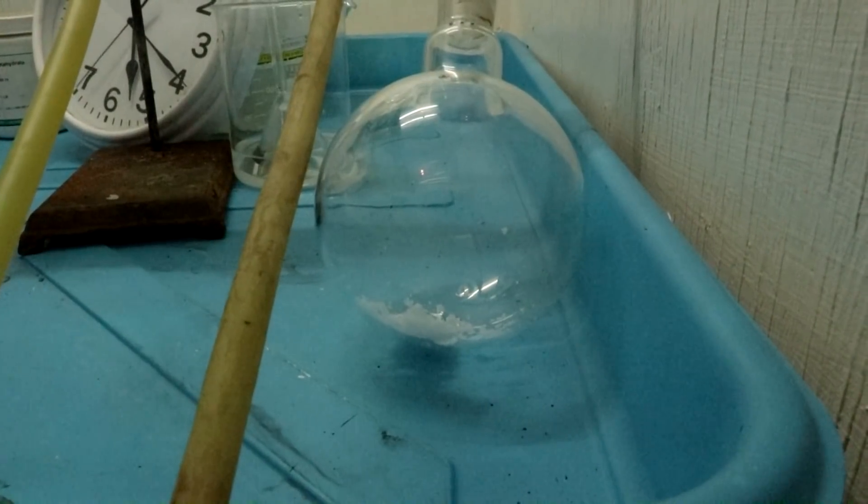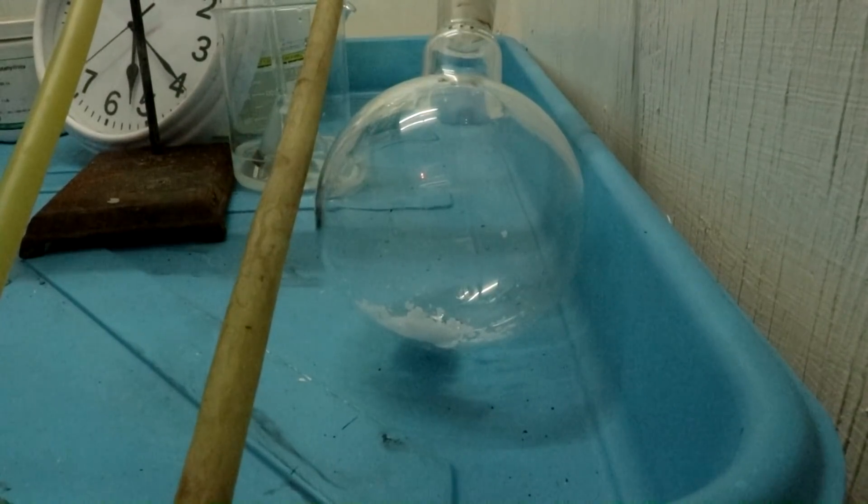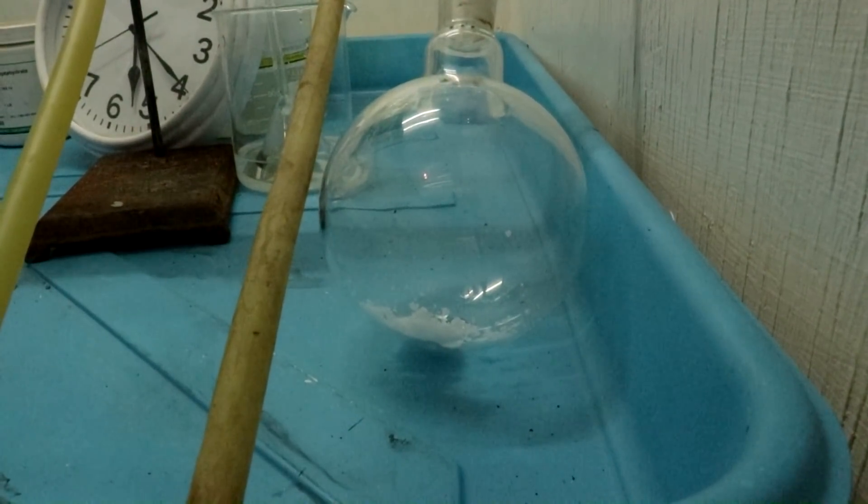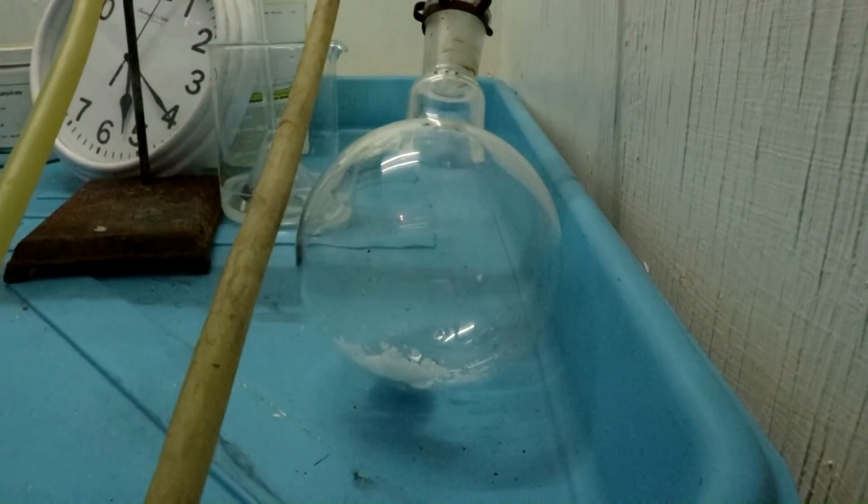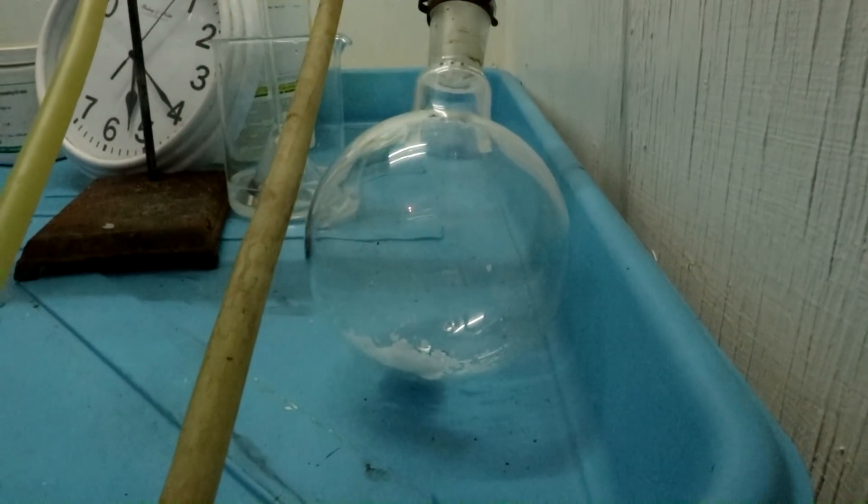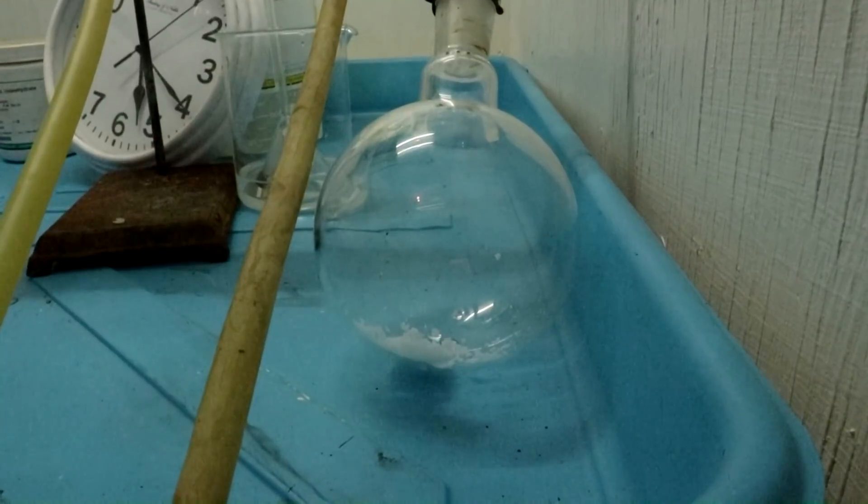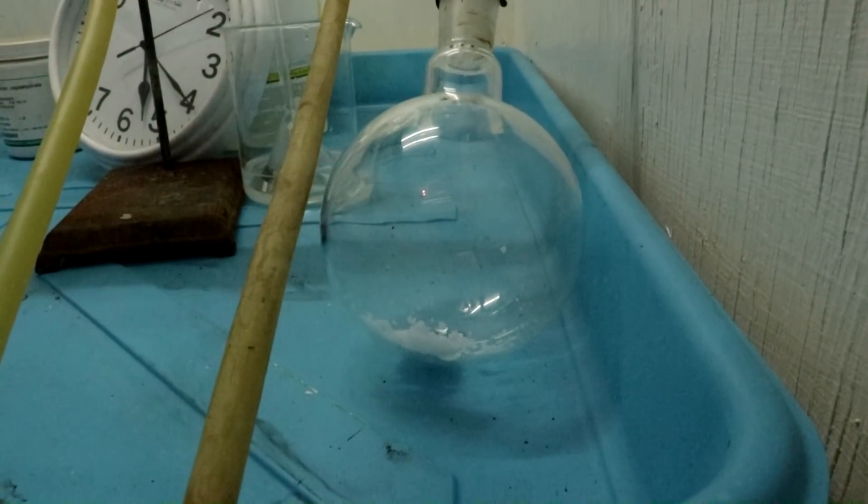What I'll form over here is the salt of prussic acid and sodium hydroxide, sodium prussate, which is far safer due to its low volatility. Plus the sodium or potassium salt is what I need to dissolve gold anyway.